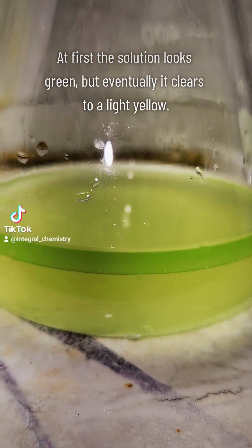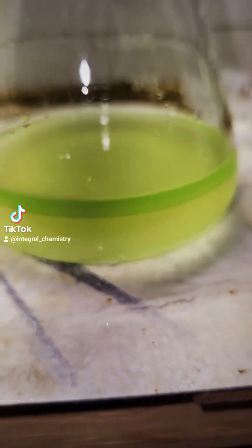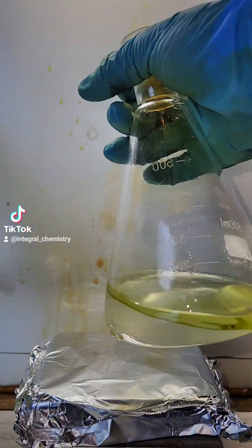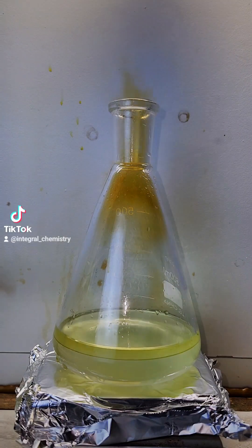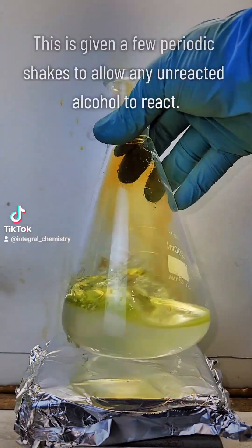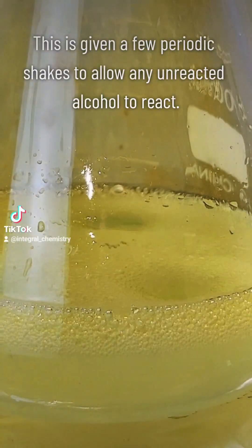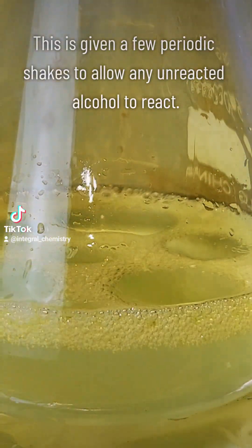At this point, the reaction probably isn't quite done yet, so I'm going to shake my vessel under my fume hood a couple of times to make sure everything's thoroughly incorporated and reacted. Waiting for nitrogen dioxide to stop being produced is not an indicator that the reaction is done, as I did use an excess in this process.